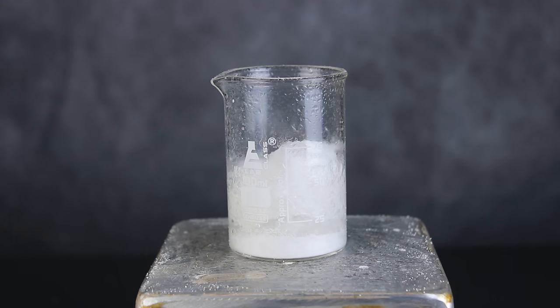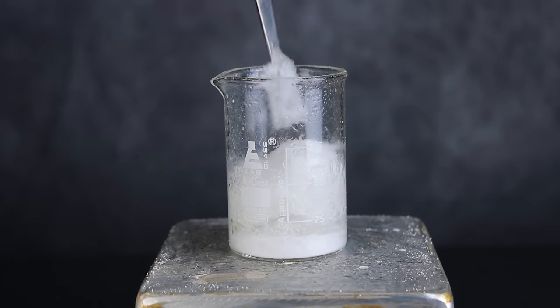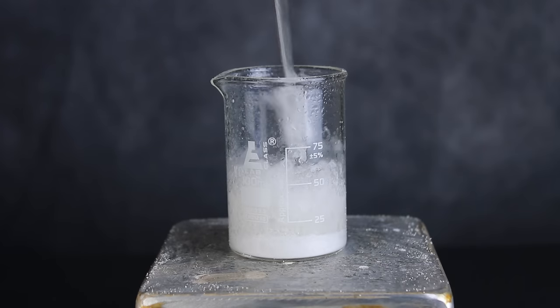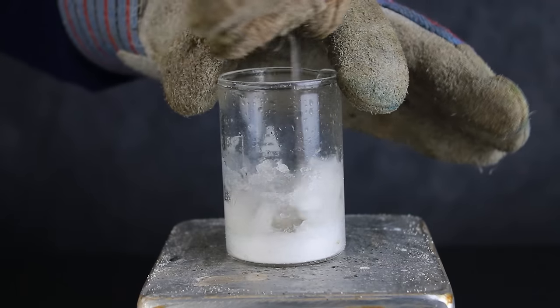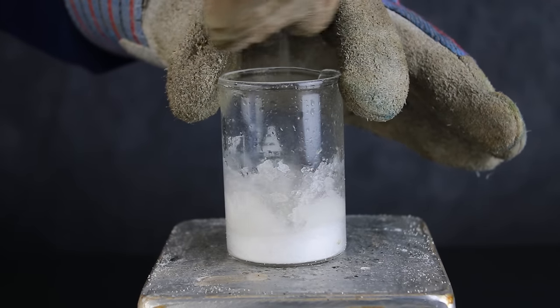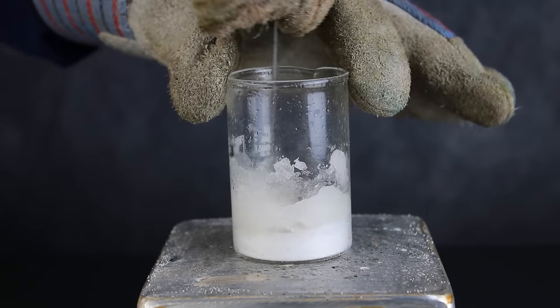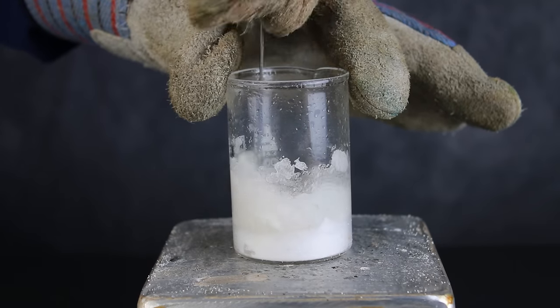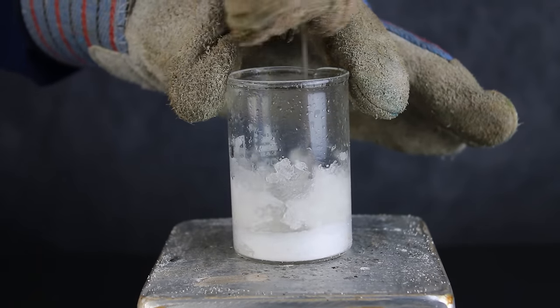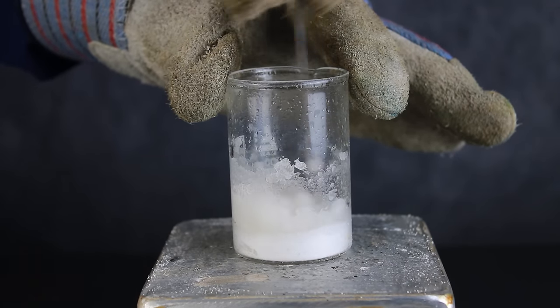As the liquid began to crystallize, the stir bar was removed and the boiling was allowed to continue. After some time, the solution turned into a gooey paste, which was cooked further until it turned solid and powdery. This solid is sodium acetate, and it is what we are after for this reaction. Now, you may be tempted to just stop here since everything appears dry, but that isn't really the best idea. Some water is likely still present, which could inhibit our main reaction later on.